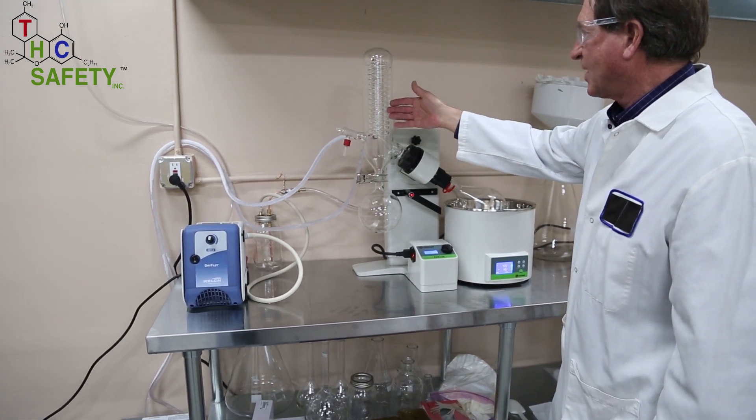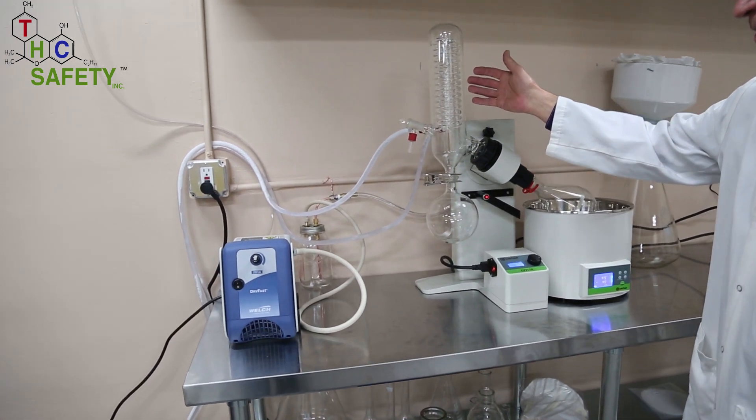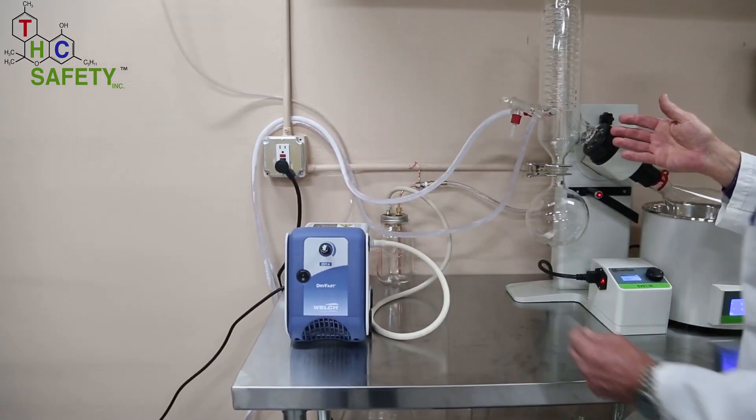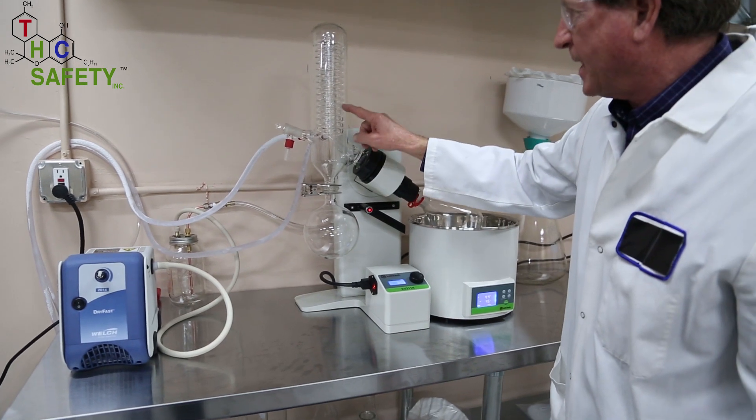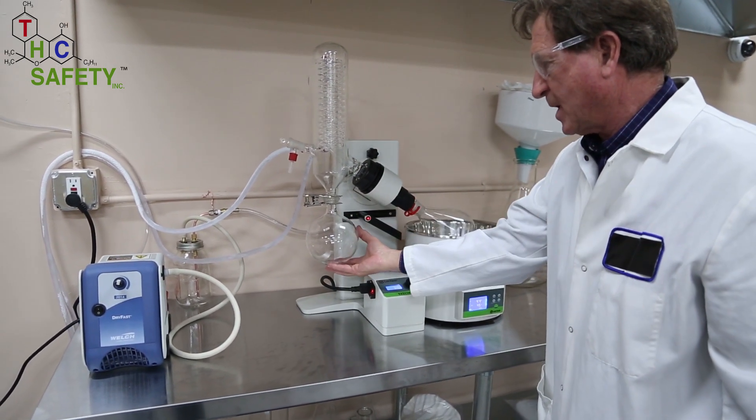The vapor is going to travel up into this condenser coil. The condenser coil is being chilled by the chiller. The vapor will condense on the surface and drop down into this reservoir.